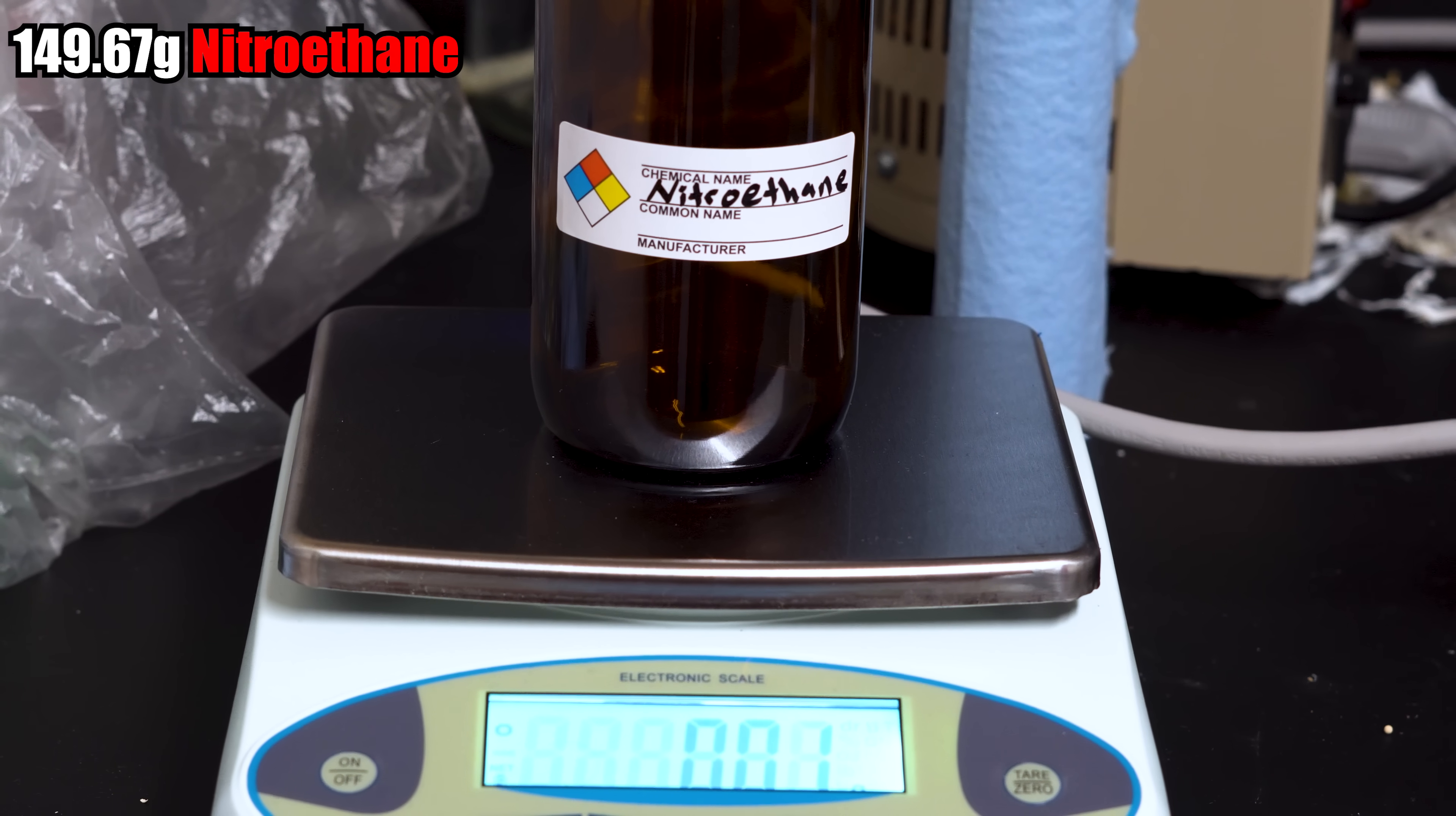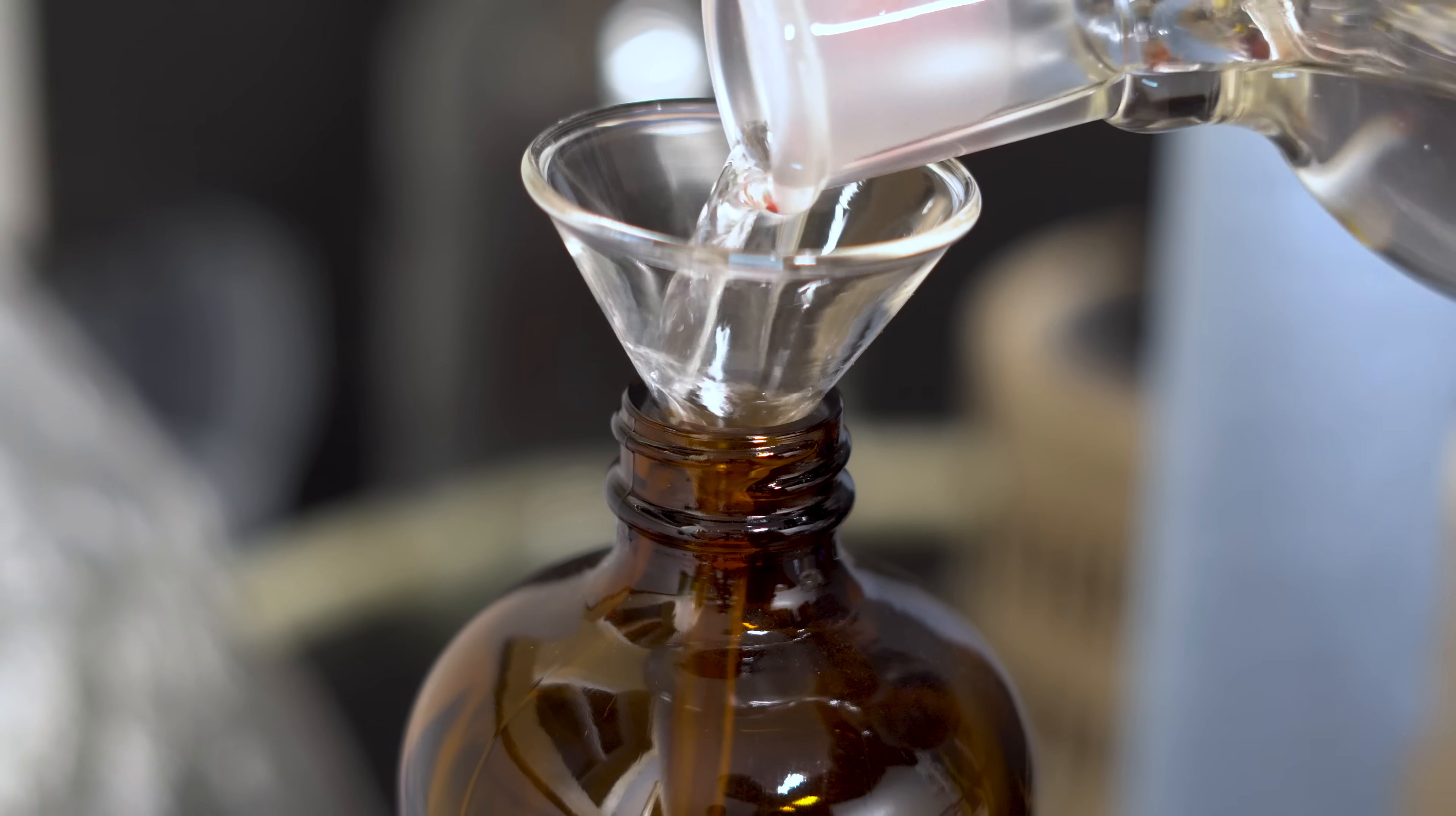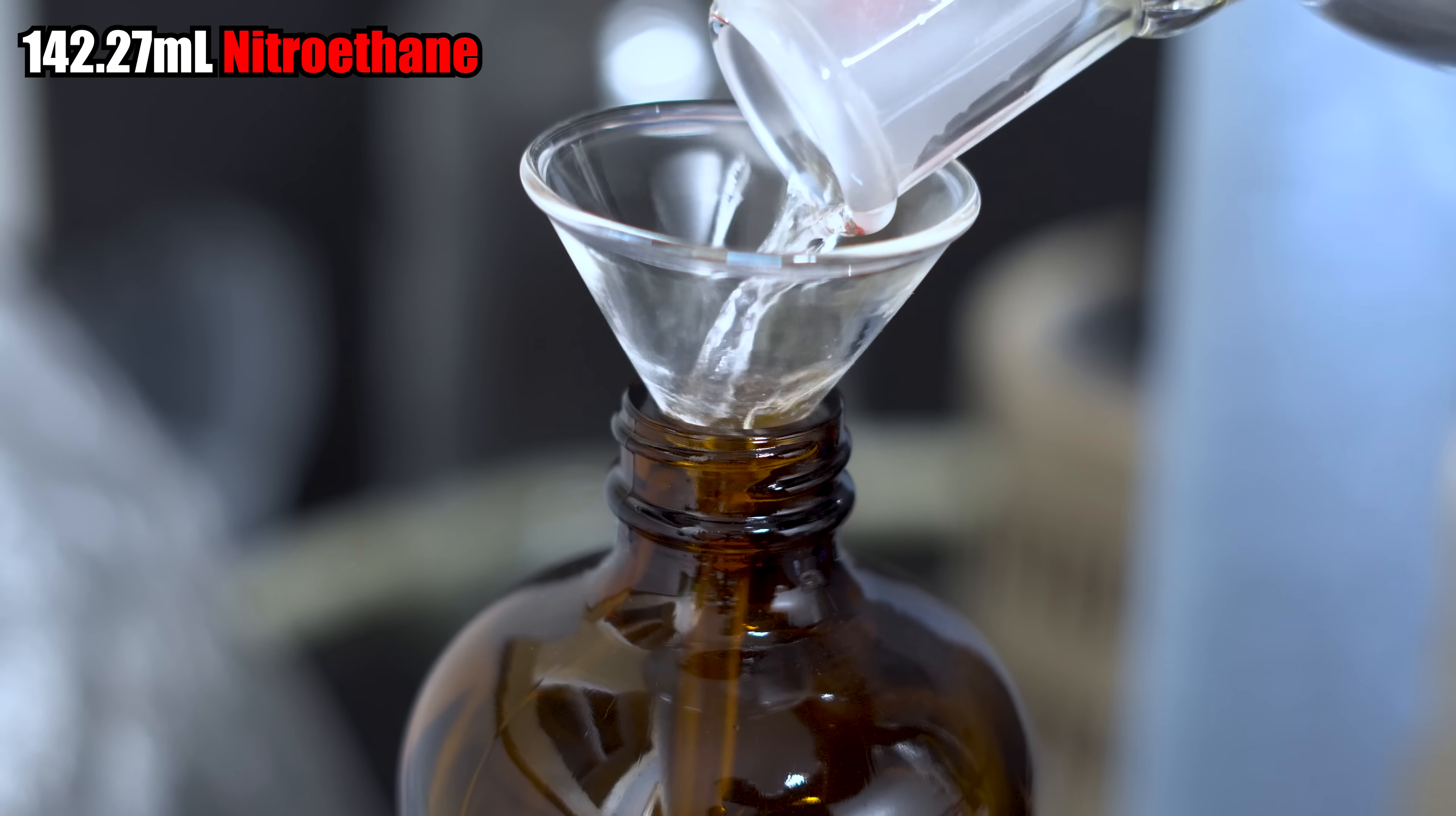As for the nitroethane, I got 149.67 grams. This equates, if pure, to about 142.27 milliliters of nitroethane.